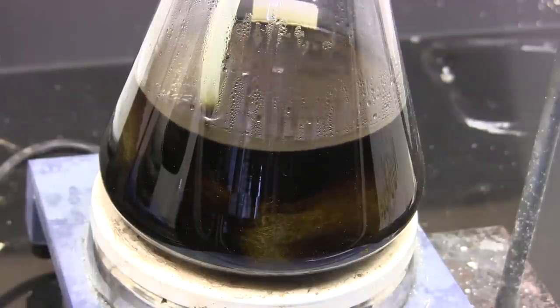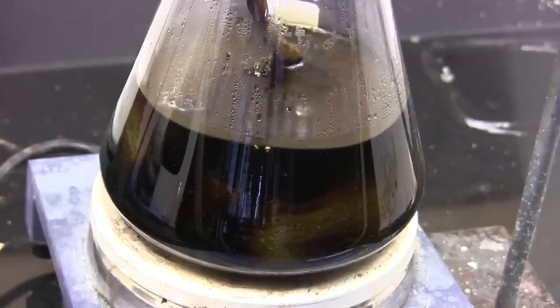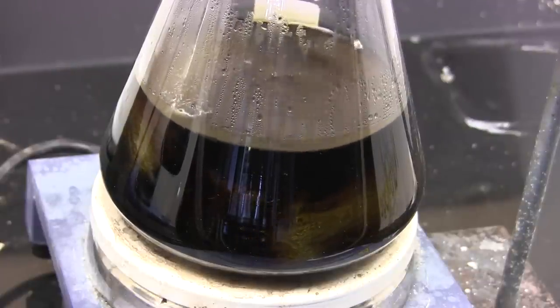Okay all the chlorine has been added. Now we just let the mixture stir for an hour to complete the reaction and then we let it cool completely to room temperature.